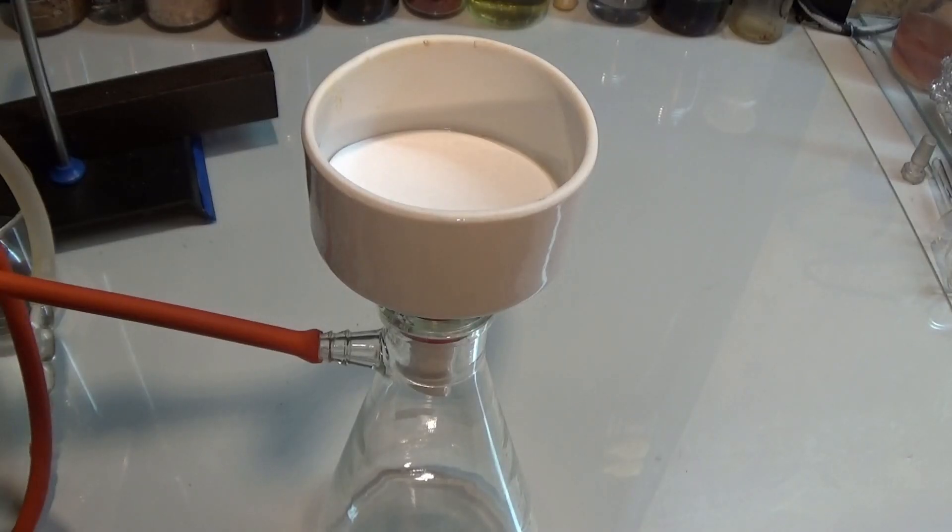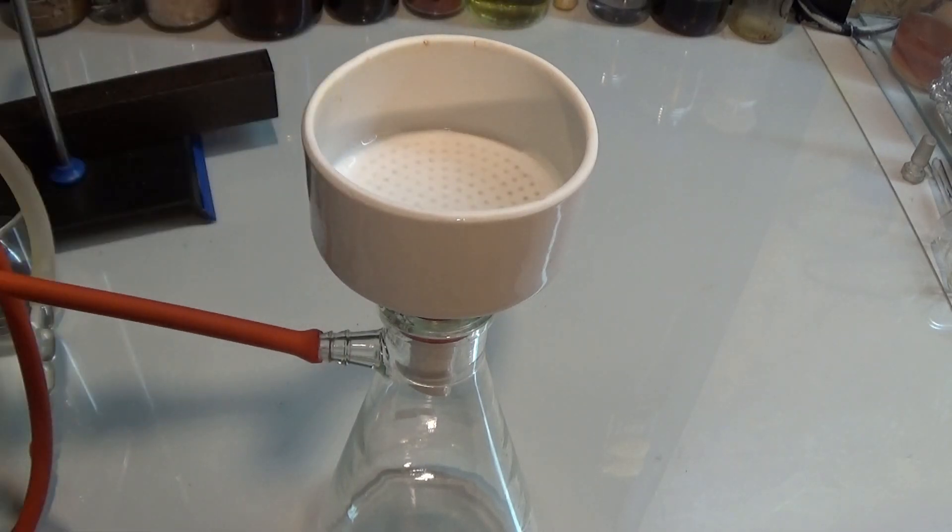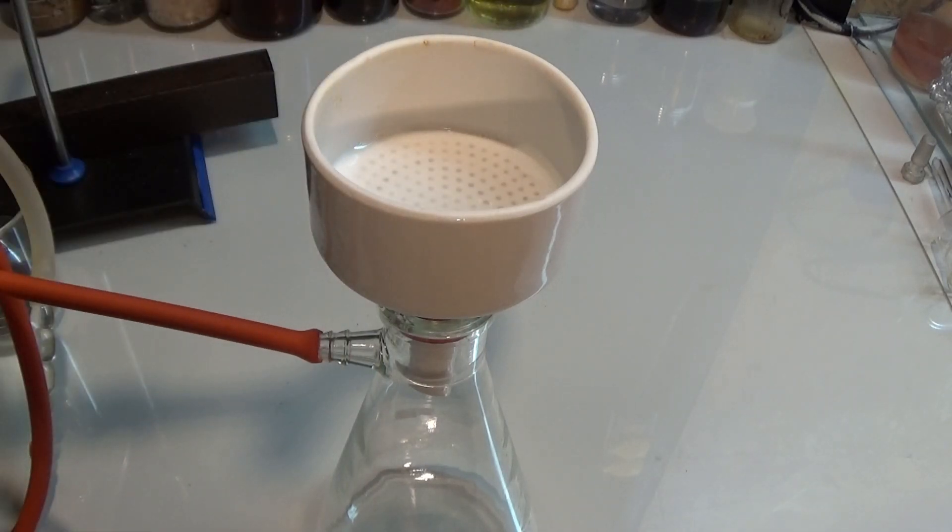The water washed hardener is then filtered off using a Buchner funnel. Pro tip: wet the filter paper with whatever solvent you are using.